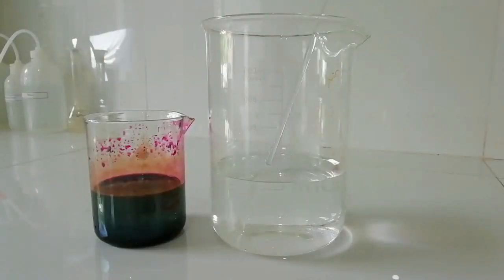After doing the reaction, here I have left with highly concentrated permanganate solution. To deal with this solution I have to make this permanganate less toxic to the environment because permanganate solutions are very toxic to aquatic life. So here I have a clear solution in this one liter beaker, that is a hydrogen peroxide solution, and I acidify this solution by adding a few milliliters of concentrated sulfuric acid.